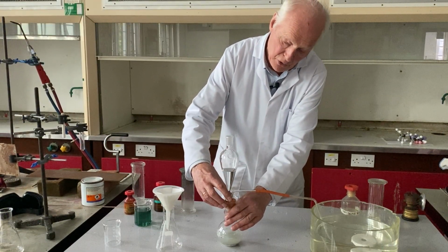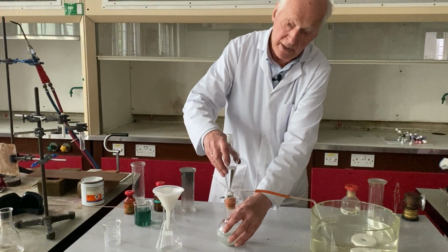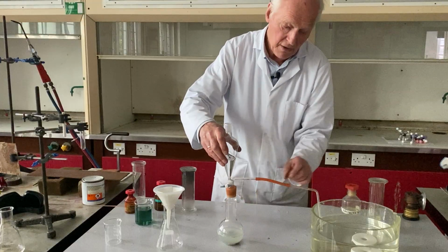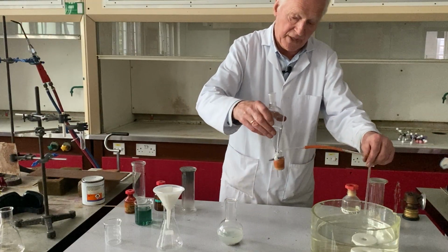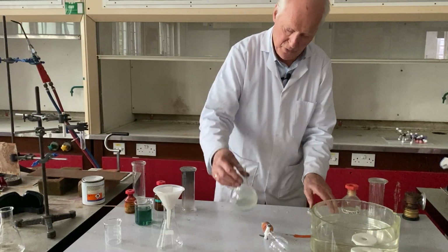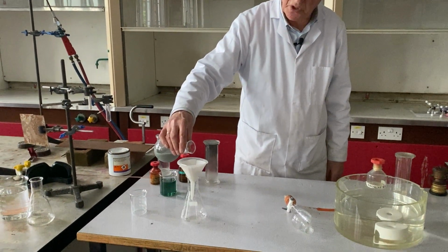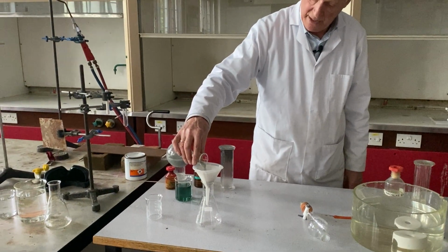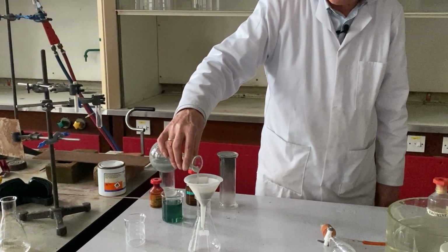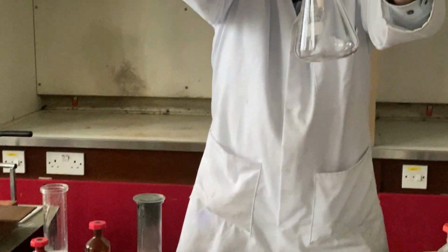So I'm going to turn off the water supply there. We now have a reasonable amount of our solution from the reaction, and we can now pour this back into here. This is just water. And now we have a reasonable amount of solution here, and we can pour this solution. And you see it's gone quite milky, by the way. And we're filtering off the solid now. We can hold this up so that you can see it quite clearly.